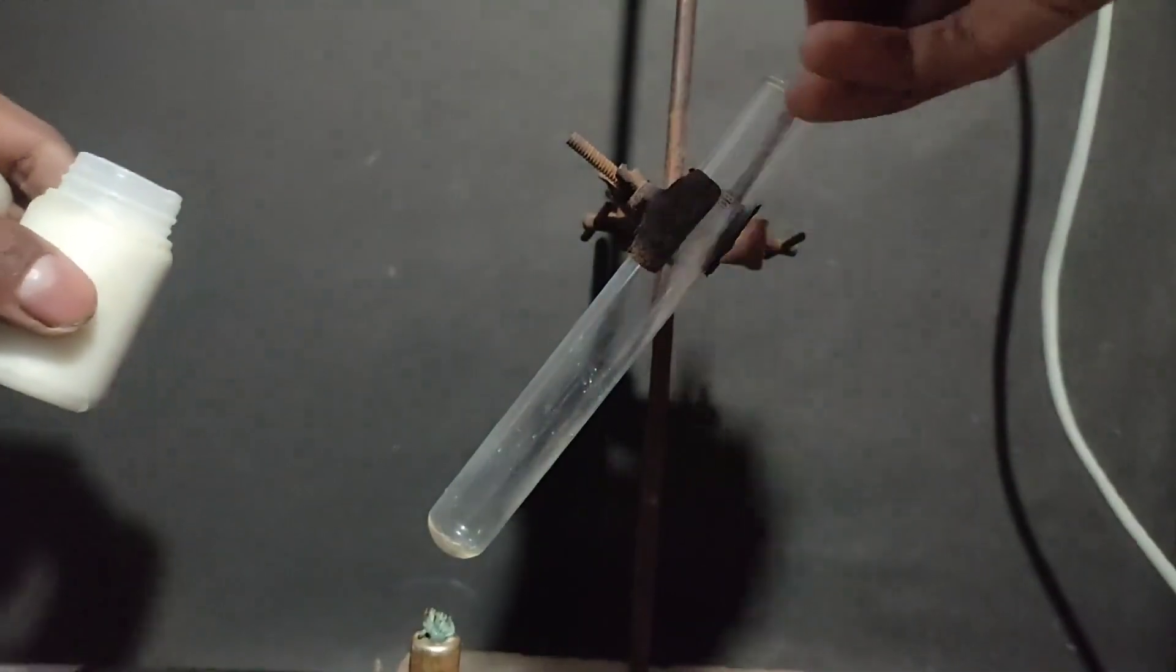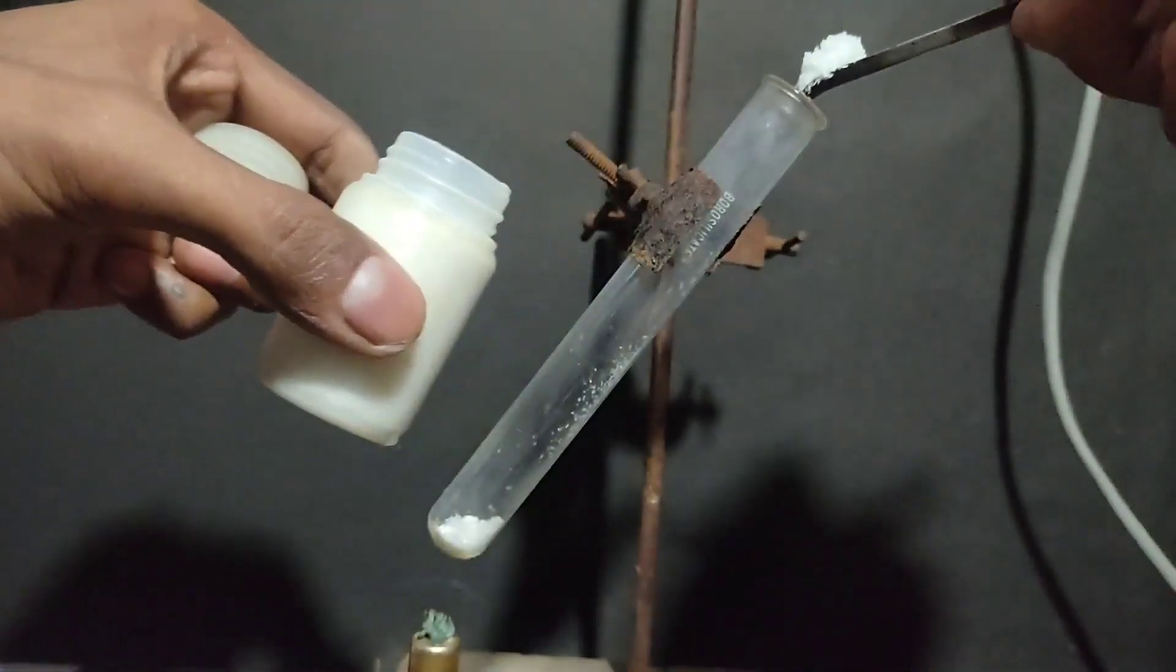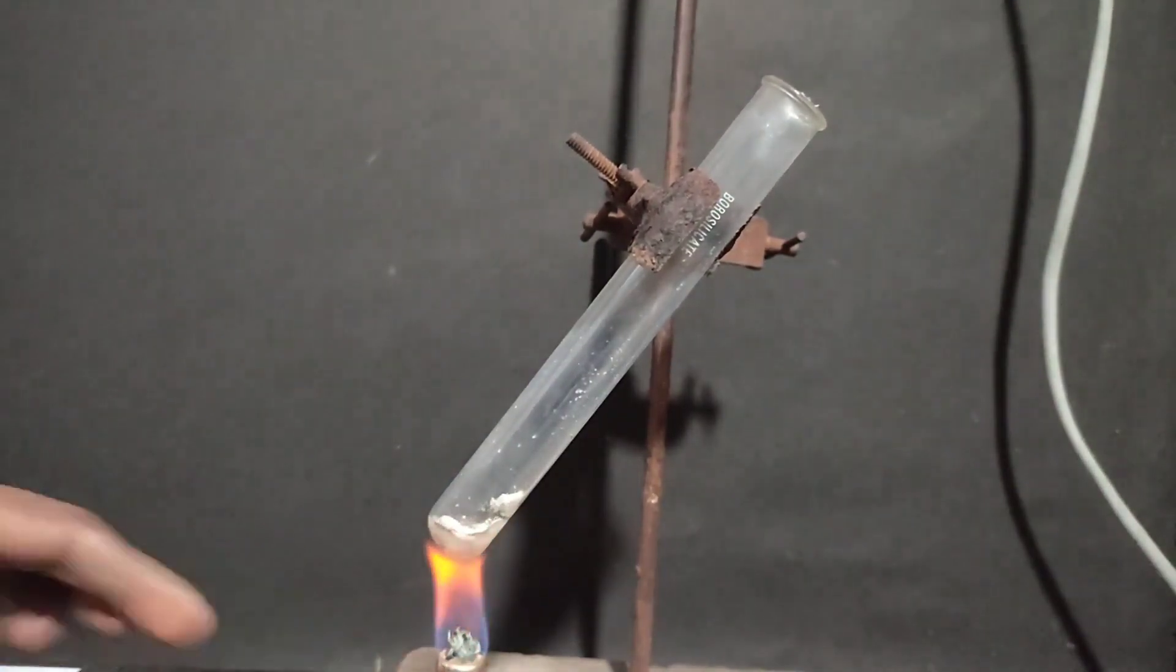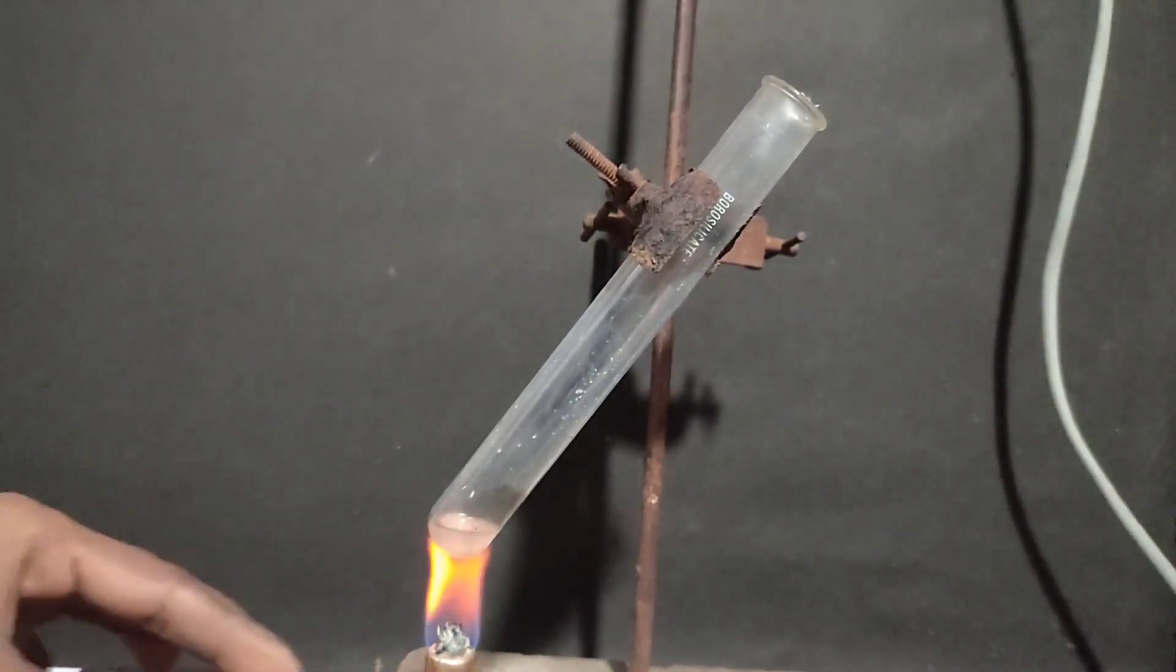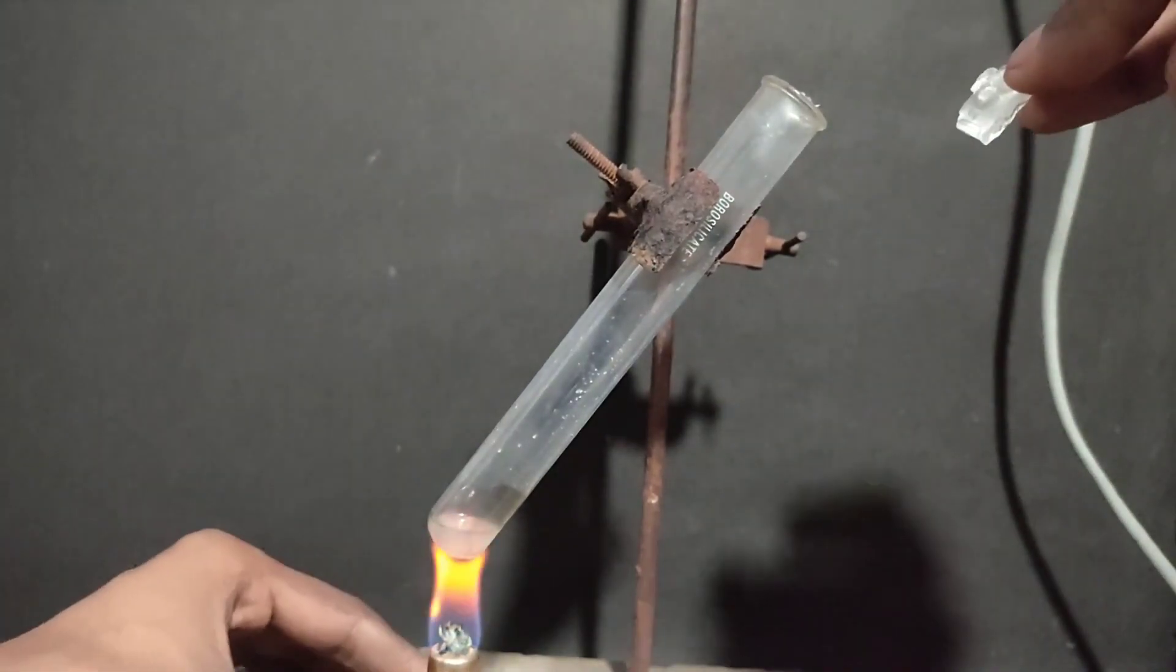Now to test my potassium chlorate I took some of it in a test tube and heated it until all the potassium chlorate started to melt. When all the potassium chlorate melted, I took a sugar cube, also called Mishri, and threw it in the test tube. And you can see the classical gummy bear experiment.